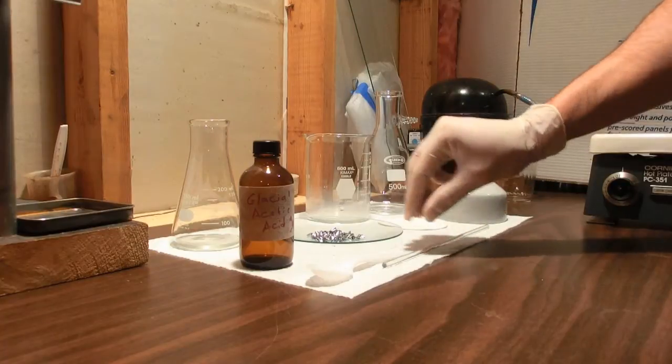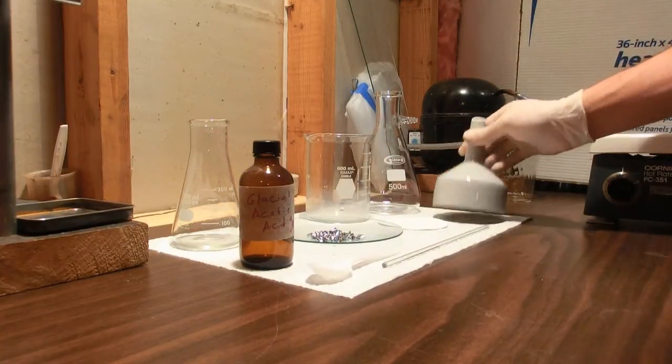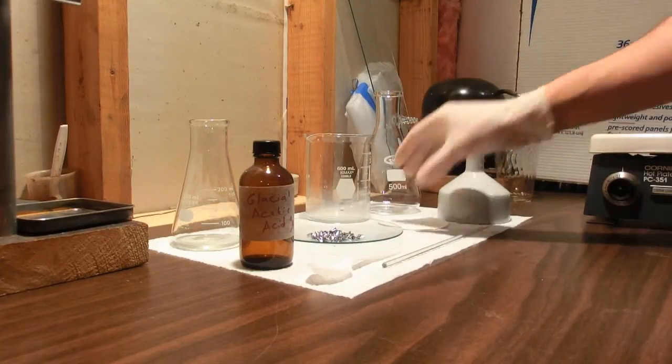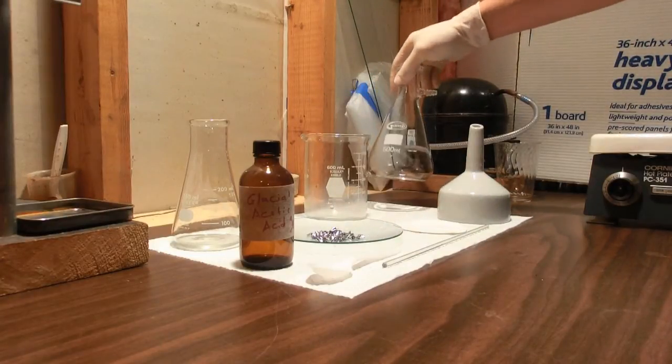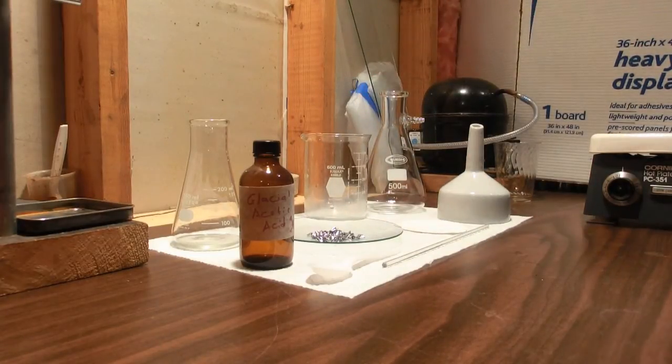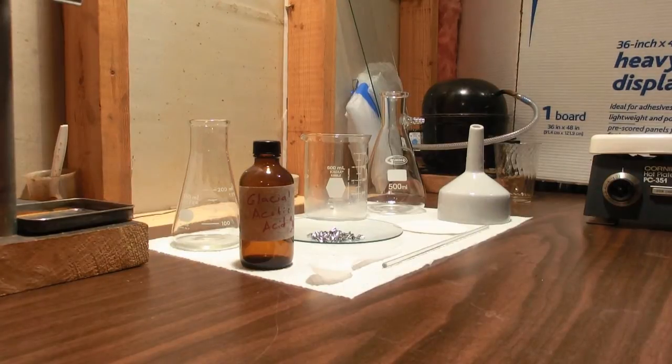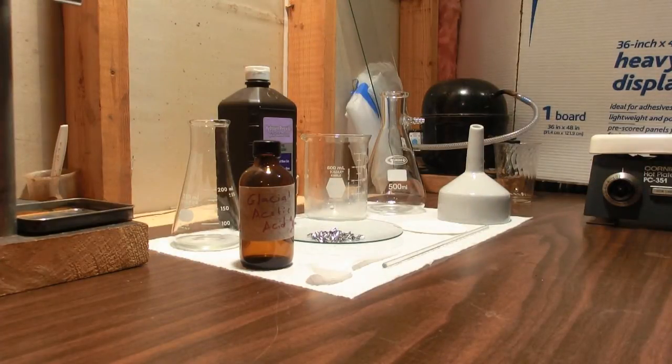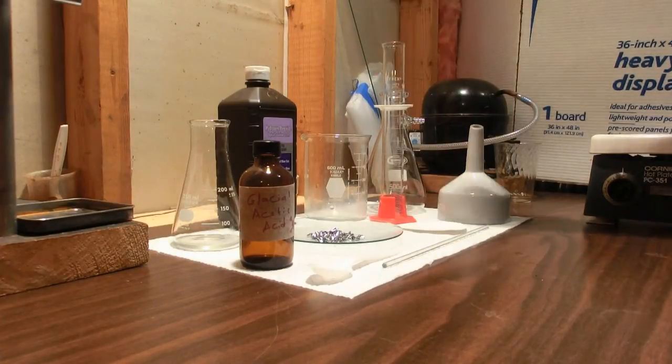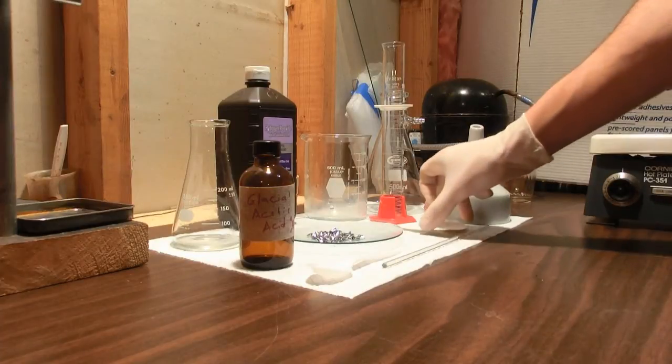We'll also need a stirring rod, maybe a spoon, a Buchner funnel, some filter paper, another beaker, and of course a filter flask. So let's get started. Oh, one more thing. Also need some 3% hydrogen peroxide and graduated cylinder.